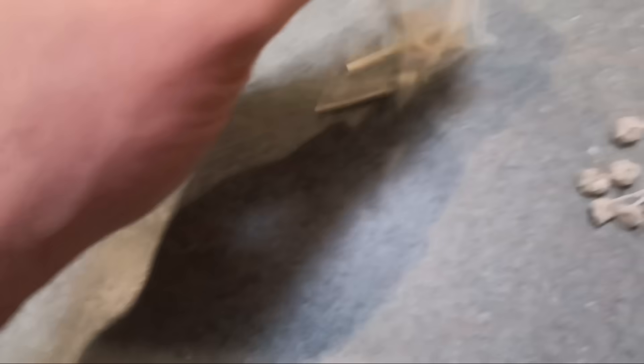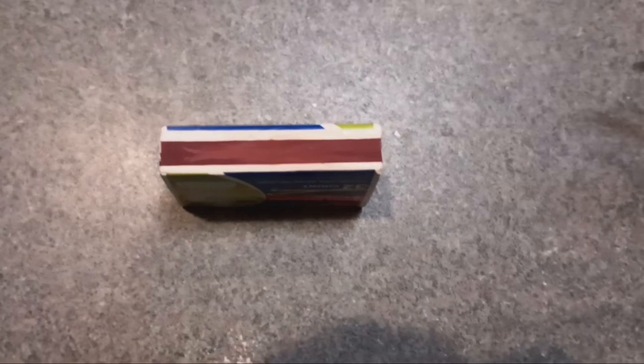I'm kidding, I'm kidding. I'm not one of those YouTubers. We're not going to need to be using any of those matches. All you're going to need is this outer red phosphorus layer right here. I'm just going to go ahead and cut it off for you guys.